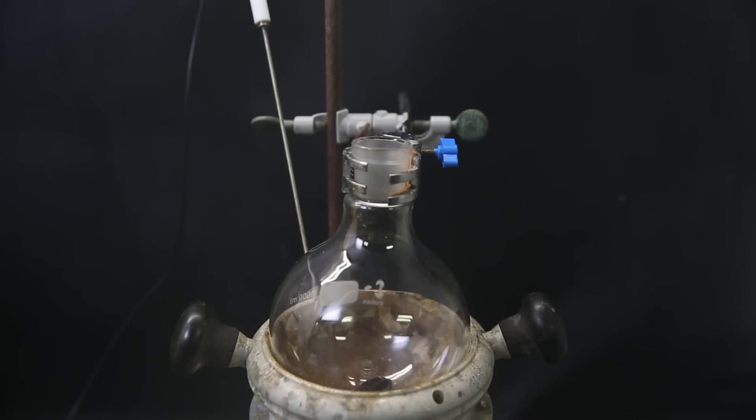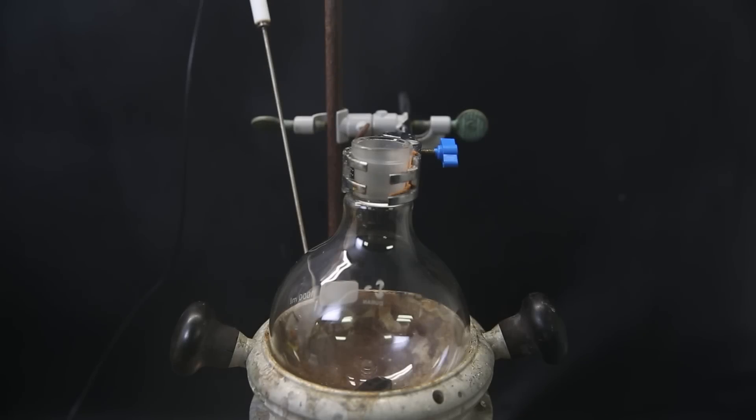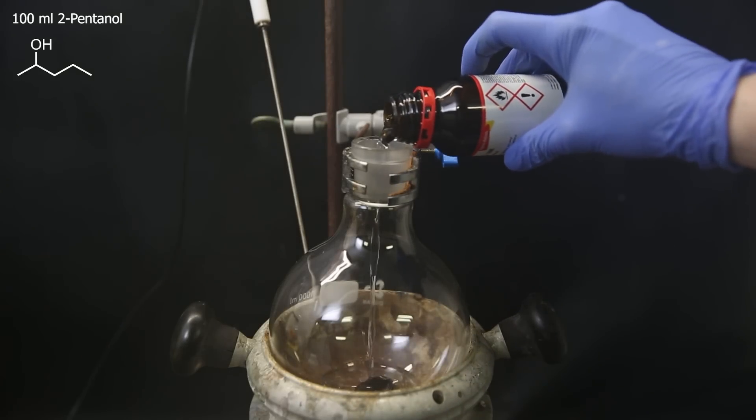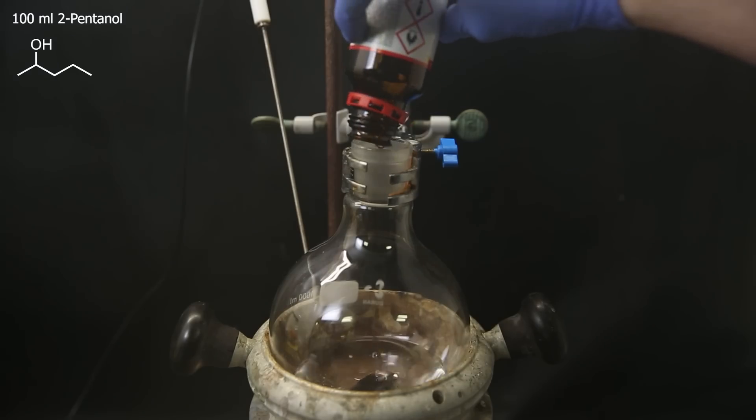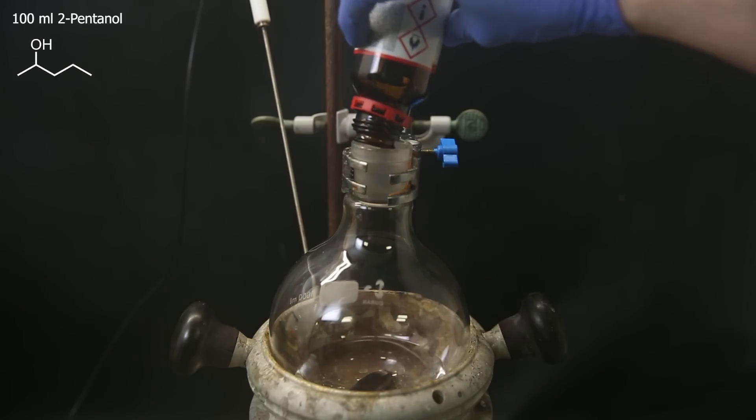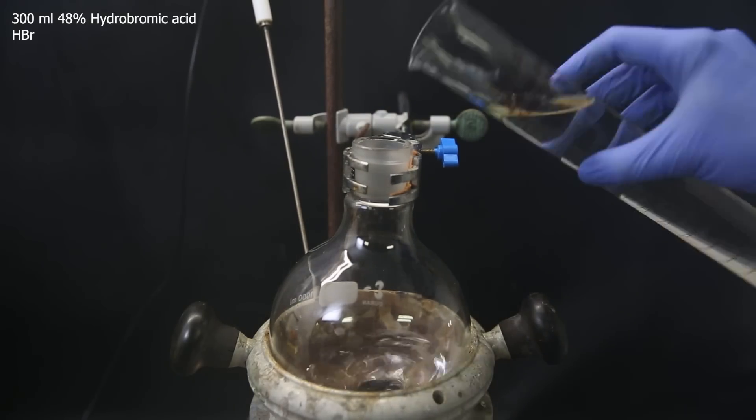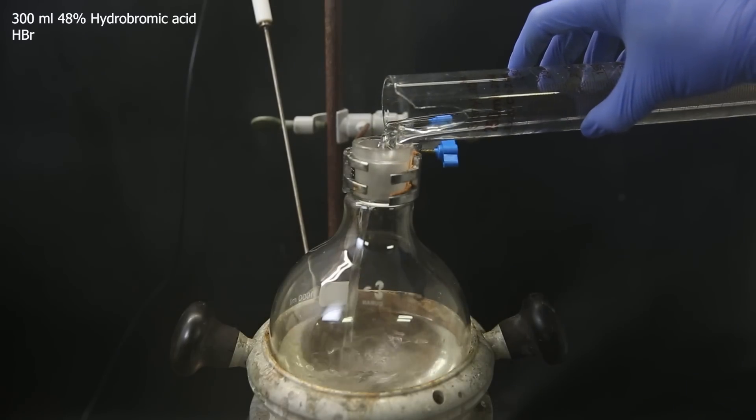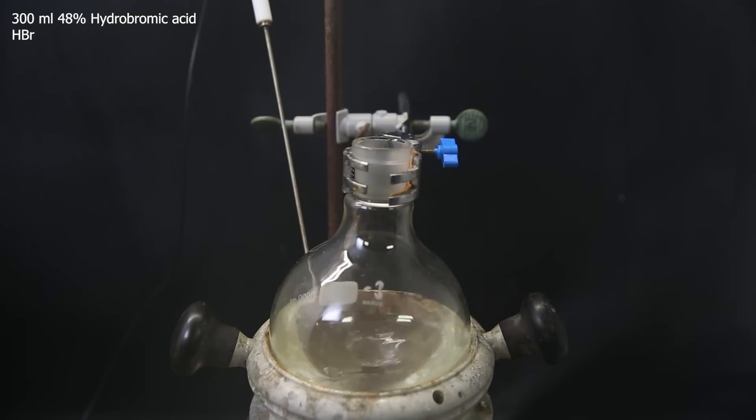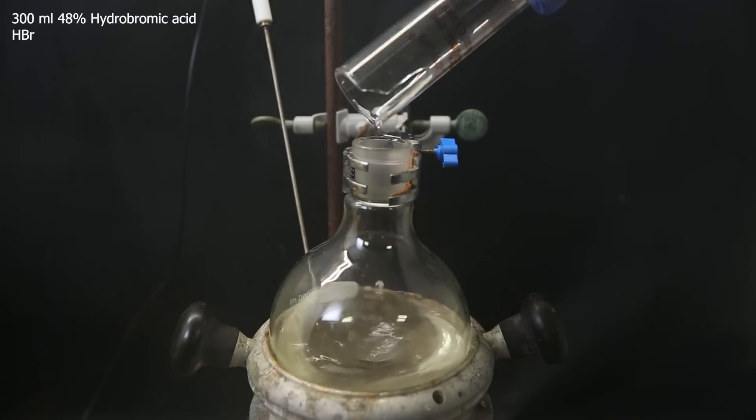So to get started, I set up a large flask with a stir bar and used the whole bottle of 2-pentanol that I bought, which is 100 ml. It is just a clear liquid, and it smells very similar to isopropanol. I then mix that with 300 ml of my slightly yellow 48% hydrobromic acid. I heat it to a reflux and attach a condenser, and then leave it like this overnight.